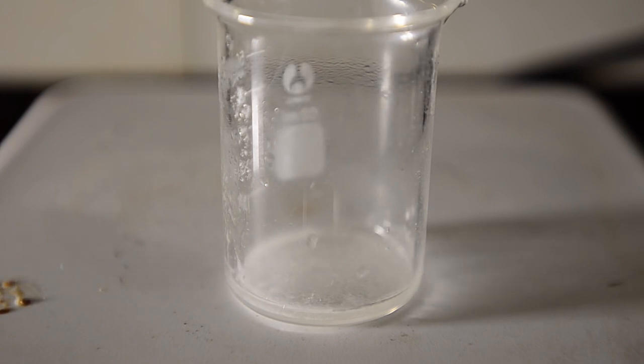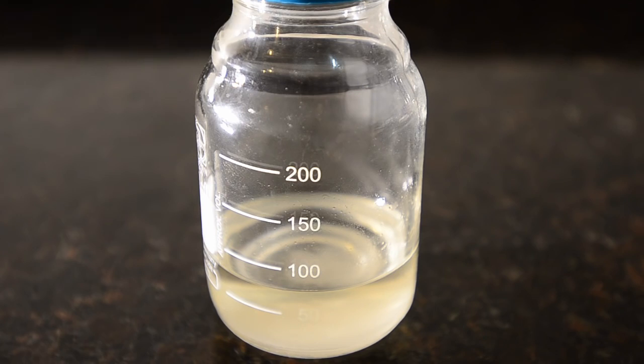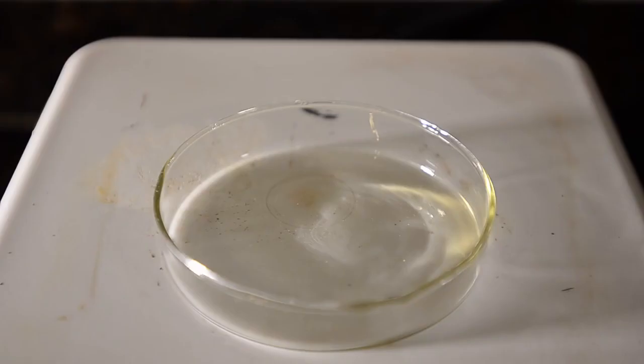So we definitely got some good stuff here and we'll have a go in a future video at using it to reduce an alcohol. In the meantime, we'll leave you with our final experiment evaporating the liquid to dryness on a glass petri dish. Enjoy.